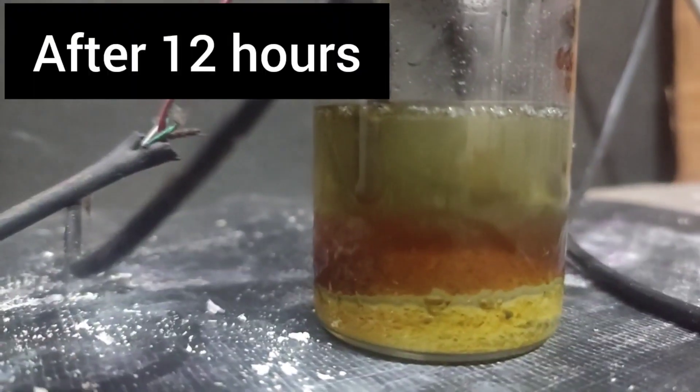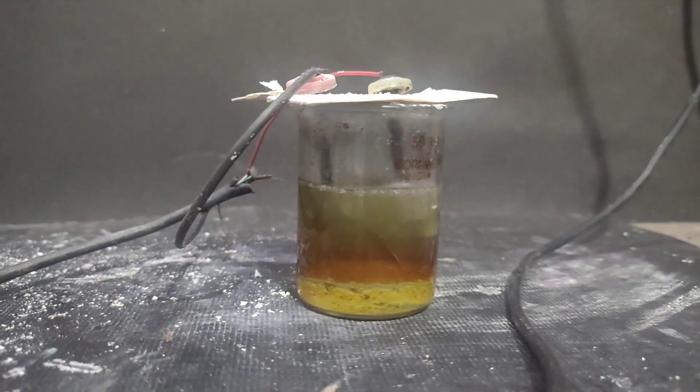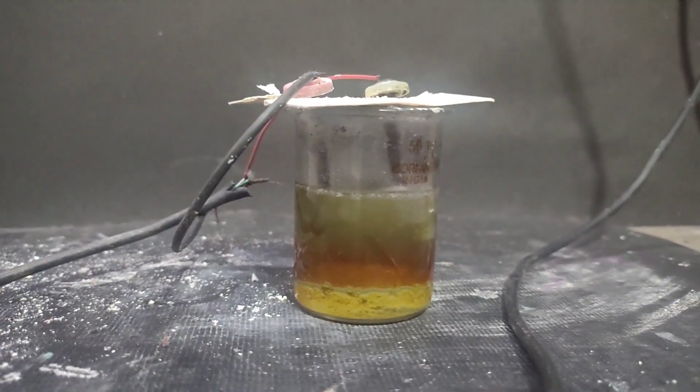You can see here, after 12 hours, three layers are formed. Lower one is the potassium bromate layer, upper one is the bromine layer and above layer is without the bromine.